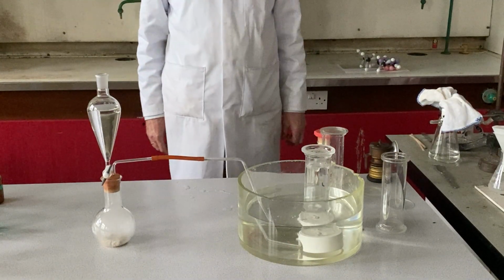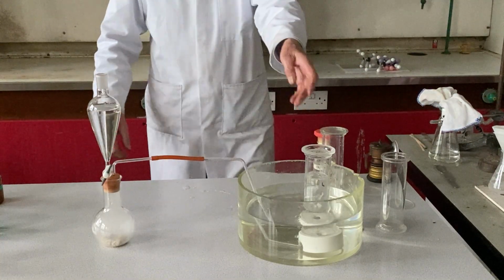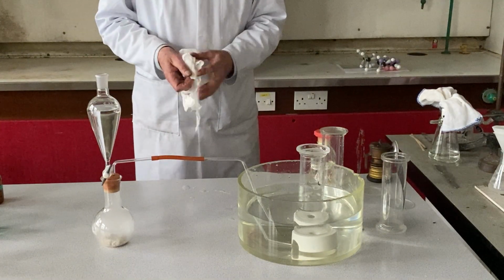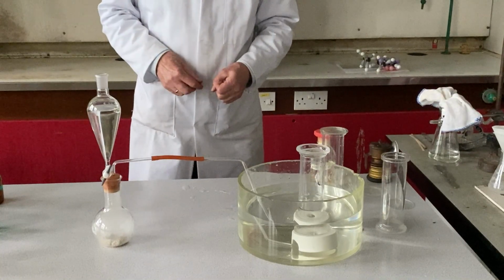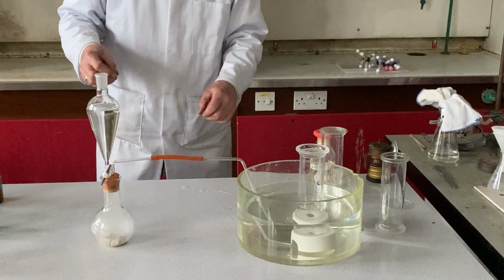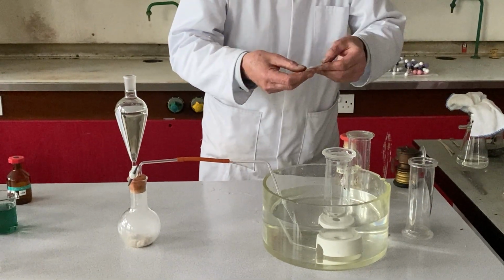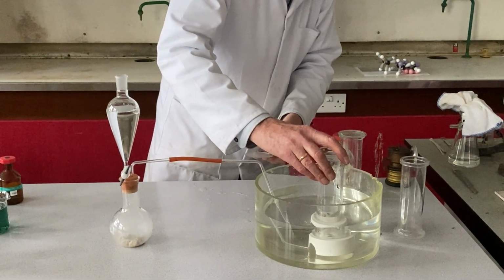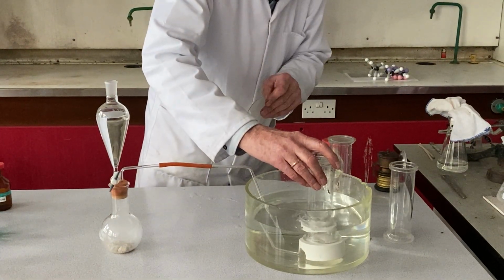So we're now bubbling the gas through. You see it's coming here, and some of it's escaping around the side. That's a little concern. And very shortly, I may add a few more drops of water. So there it is. It's continuing to bubble away. And I'm going to do some tests, obviously, that's why I'm preparing the gas. So I'm just going to slide another cover slip onto the gas jar here, and then we shall collect another jar of acetylene. However, this third jar will be slightly different.